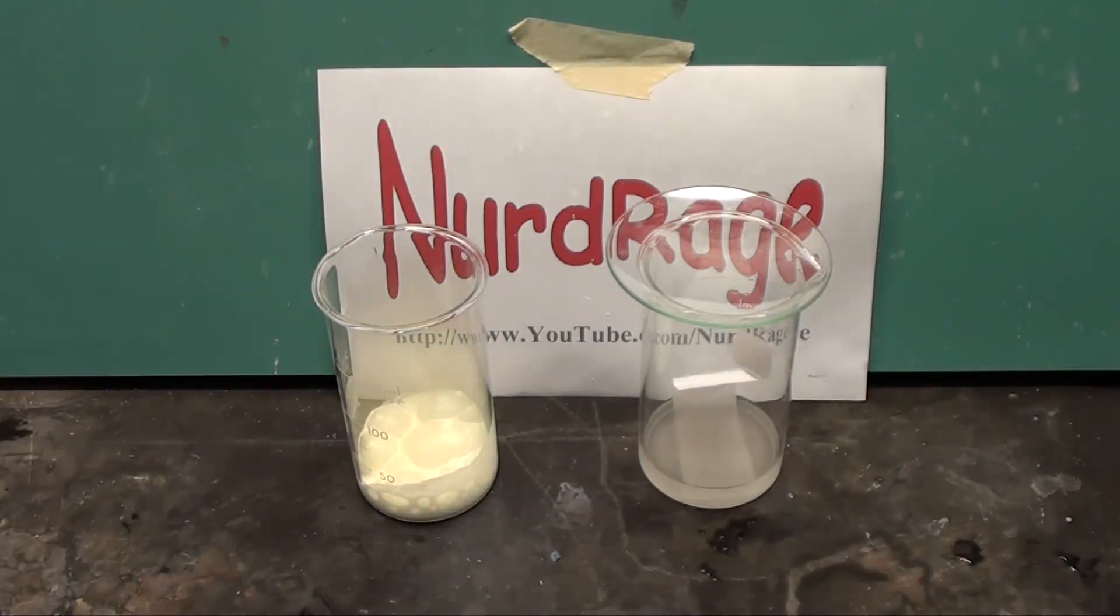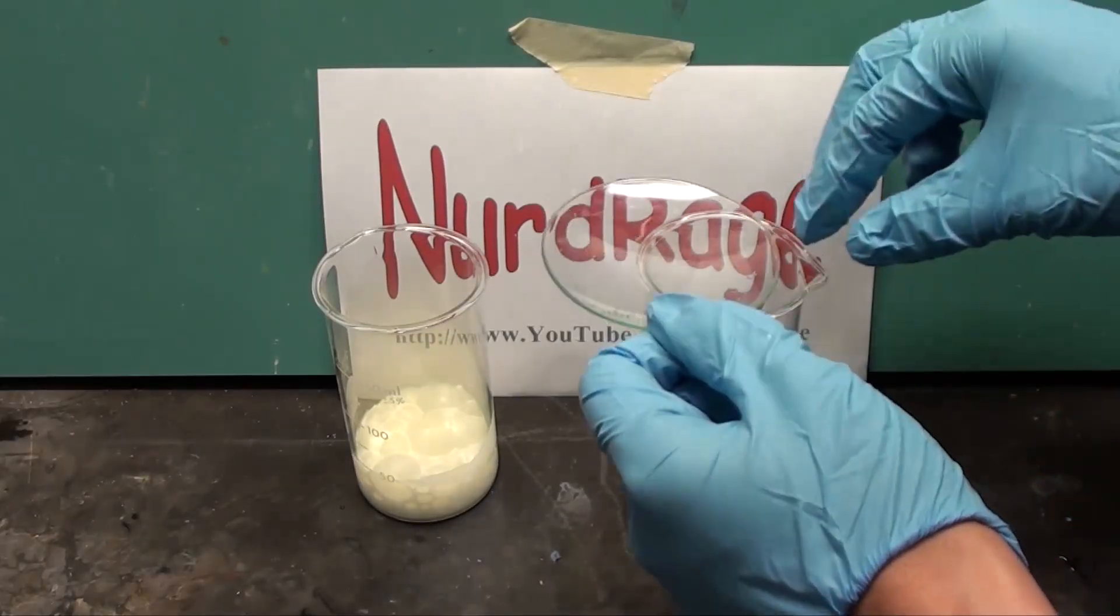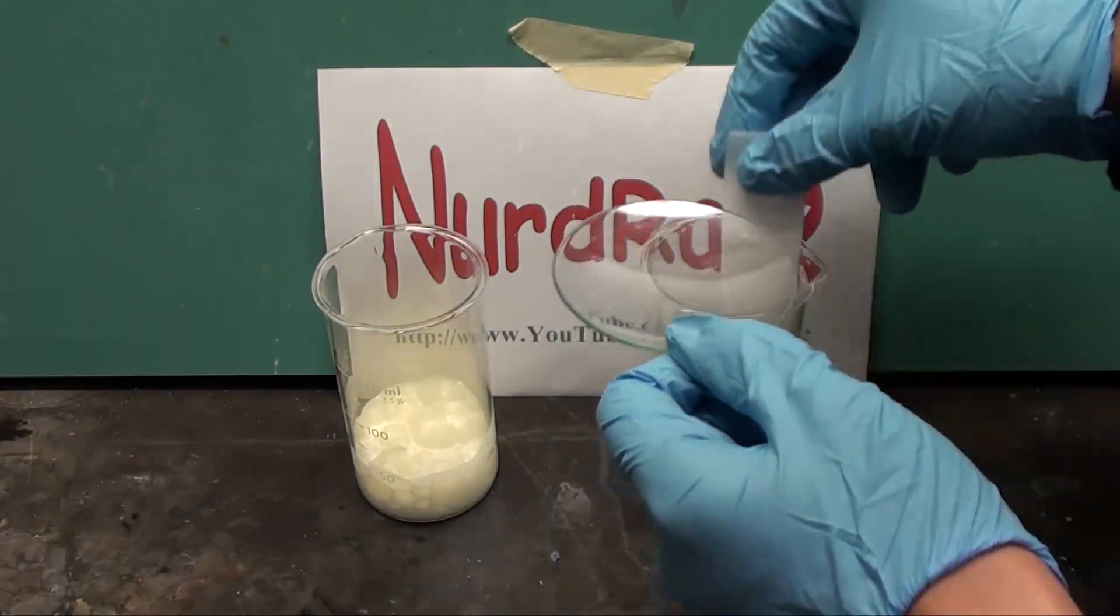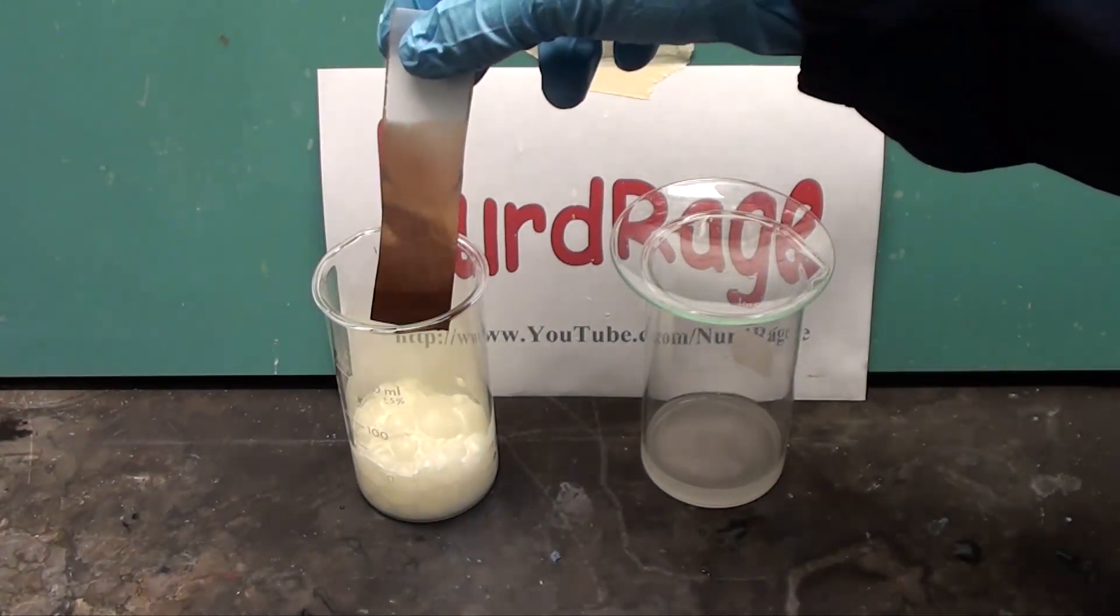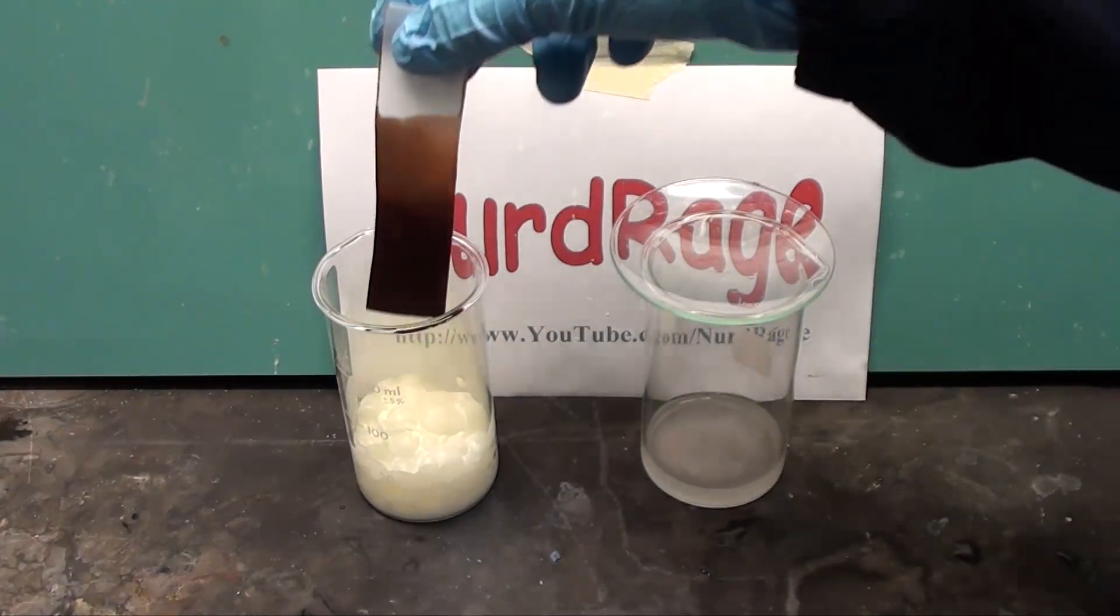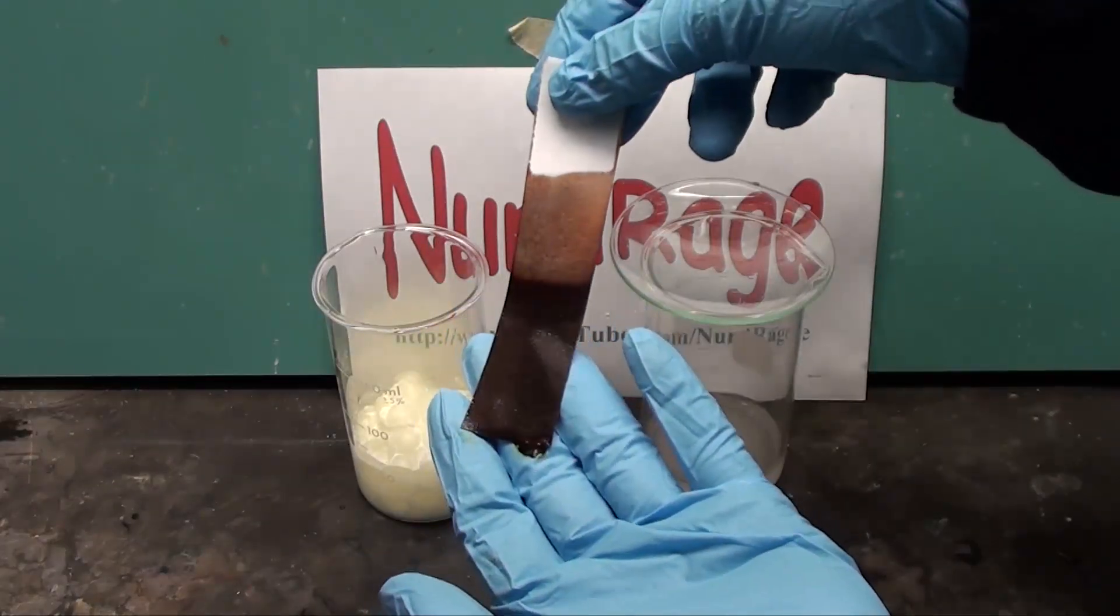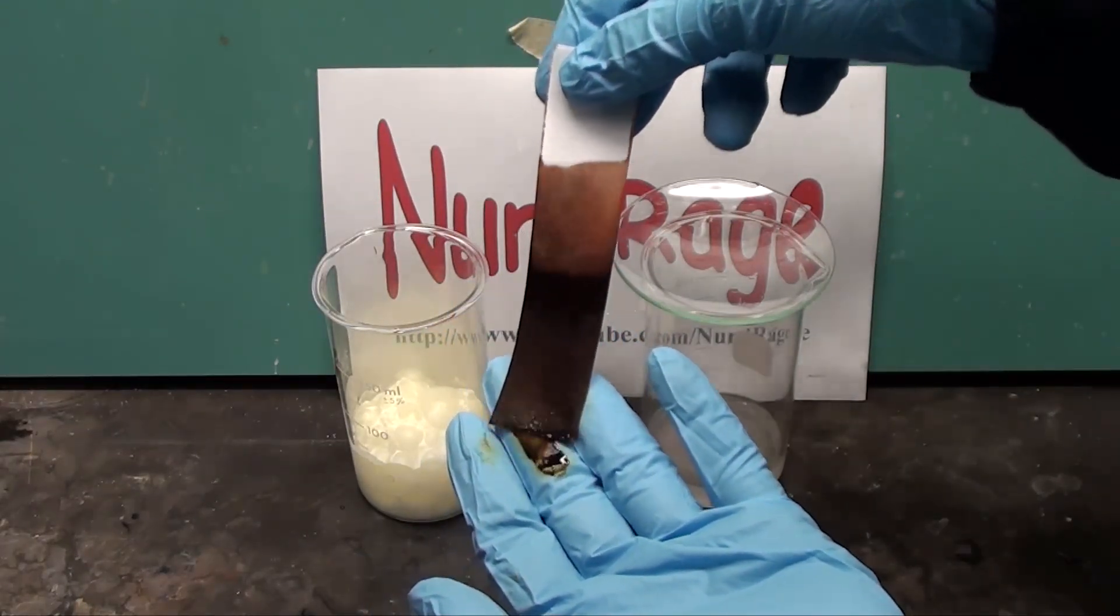You can clearly see the chlorine gas above the mixture. Chlorine is denser than air and most of it will just sit there. Now I'll get the strip and dip it into the chlorine gas. As you can see the chlorine quickly converts the iodide into triiodide that the starch detects as this dark blue or brown color.